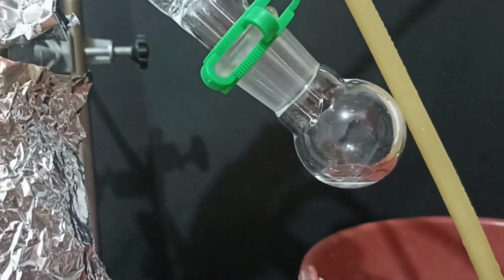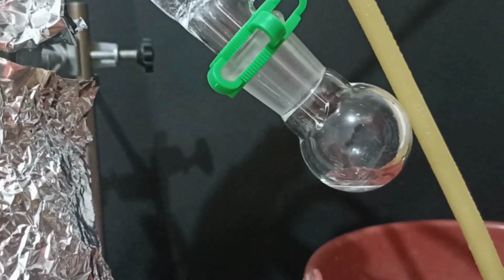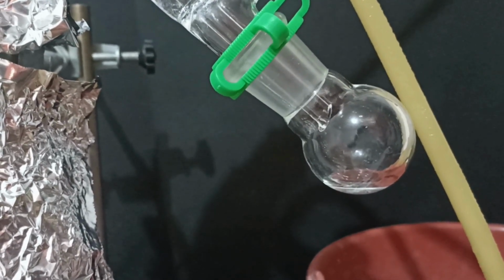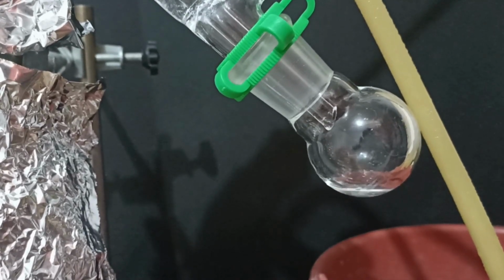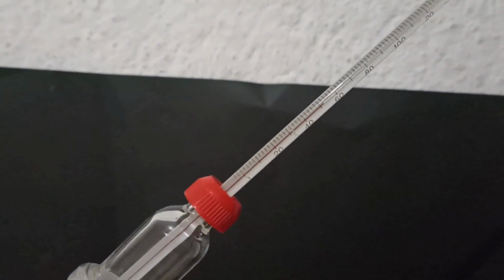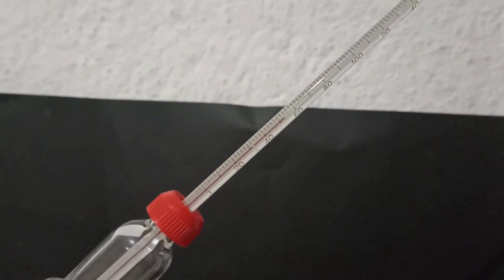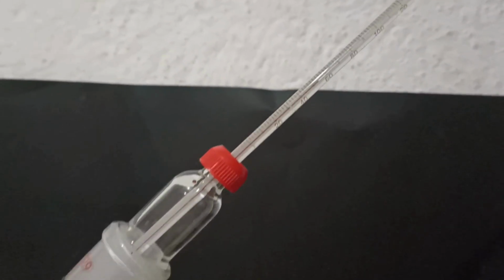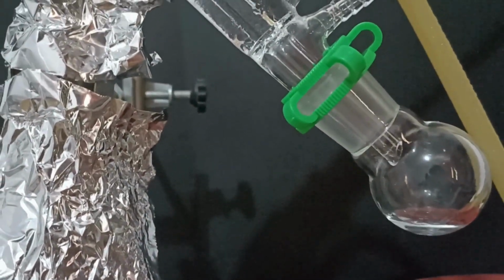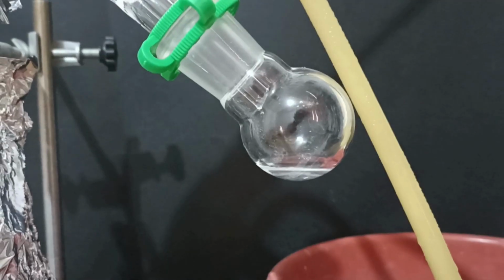When all of the distillate came out, I kept distilling water because it has a very fishy odor, and I kept both distillates. So far, way less than half of the amide has been hydrolyzed, so I tried the base hydrolysis.